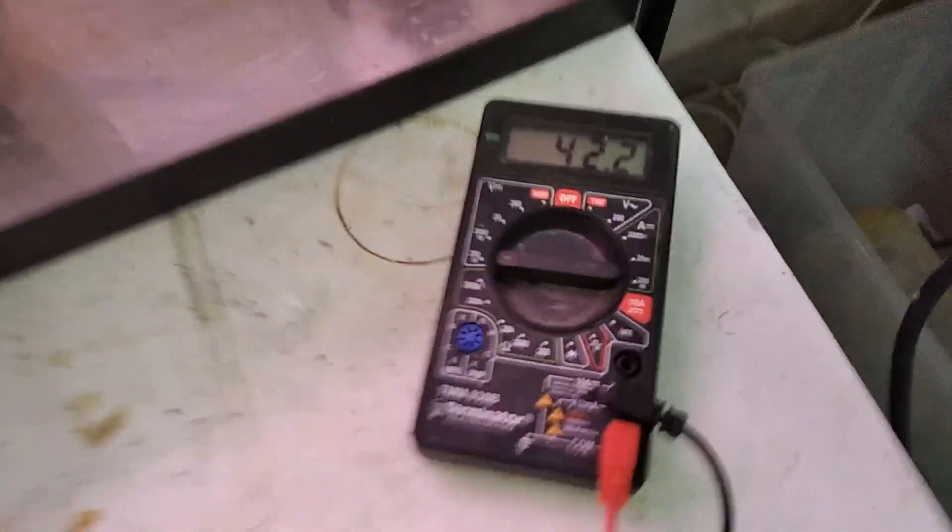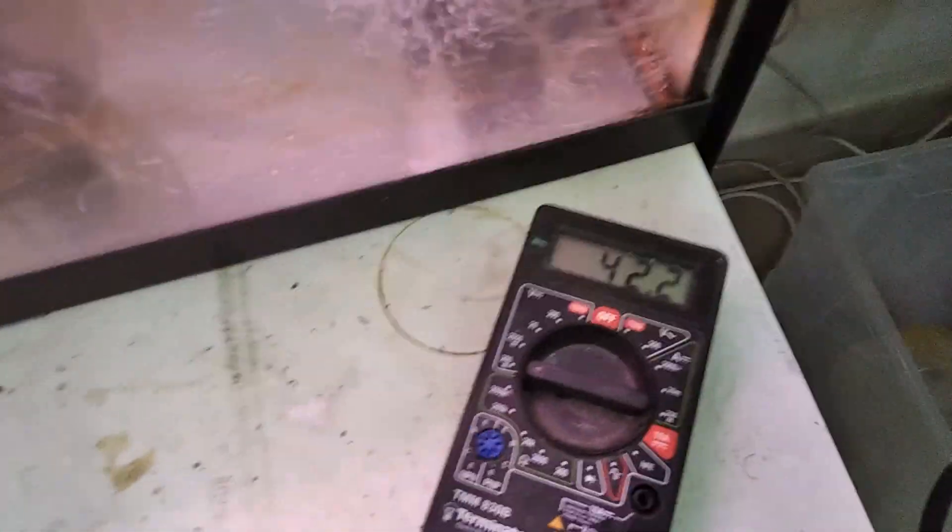I've upgraded again. I realized that the little cooler was going up to about 65 degrees Celsius, because the cooler's sides keep the heat in — which is very bad. Now I've gotten an aquarium that has glass sides and a larger volume, so the temperature will be much better controlled. I've also got the same turbulence going on. The current has dropped just because the solution is a lot colder, and the current will rise over time again. Look how clear this electrolyte is.